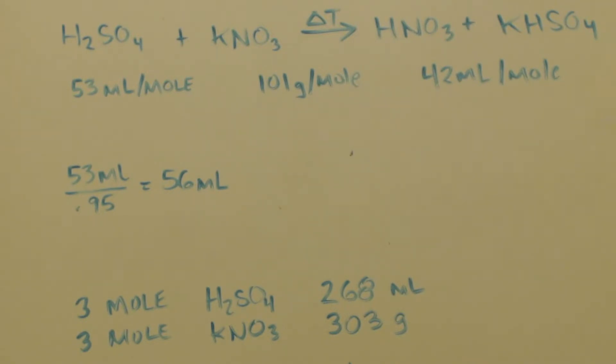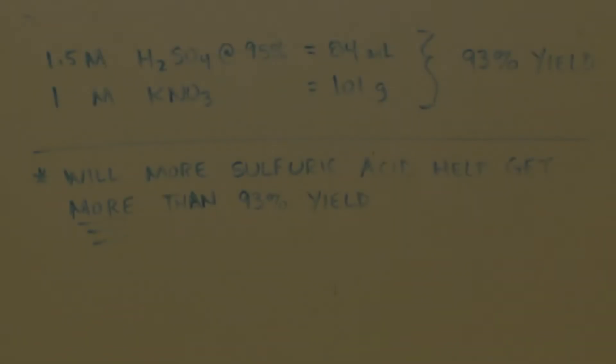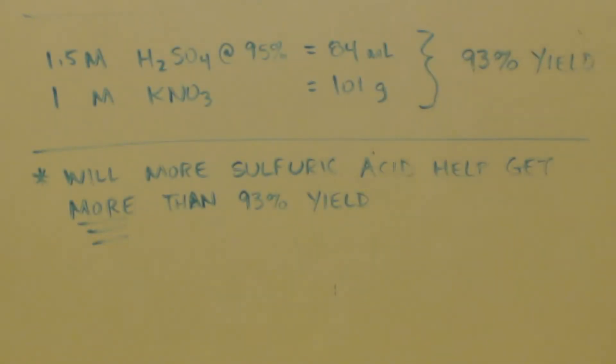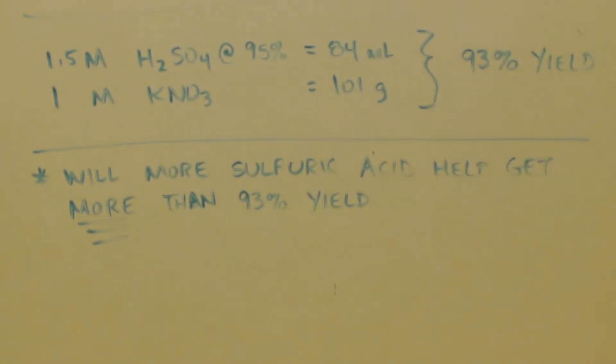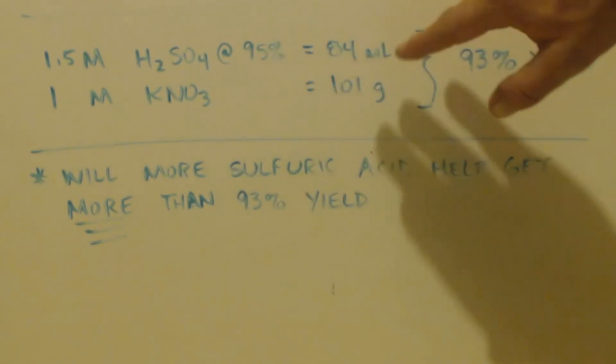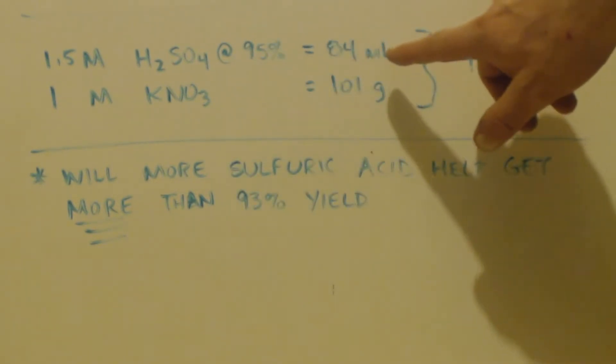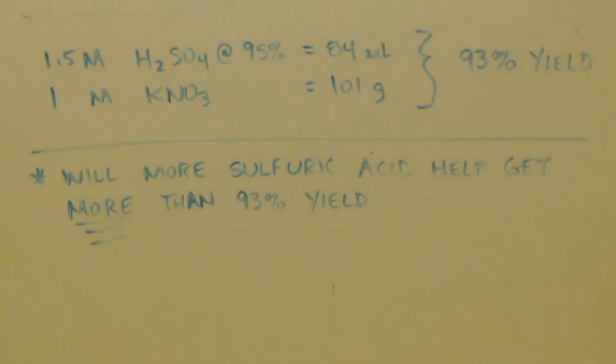Now in the first video where I only got 50%, I did a one to one ratio. That only got me 50%. Now look at this new ratio. Now the new ratio that I do and I get 93% pretty much every time. Instead of a one to one ratio, I'm using a 1.5 to one ratio. So instead of every 101 grams of potassium nitrate, instead of adding 56 milliliters of sulfuric acid, I add 84 milliliters. And that makes all the difference to double your yield almost.